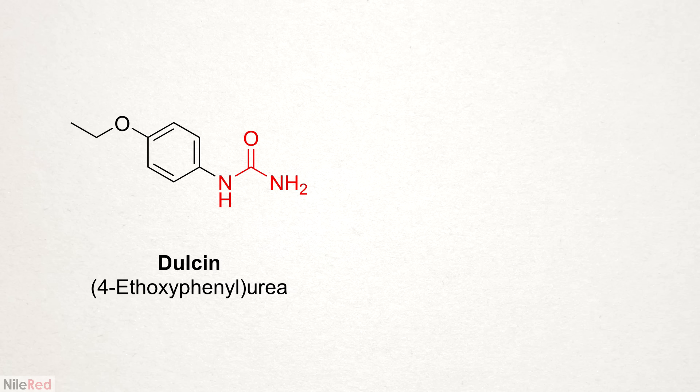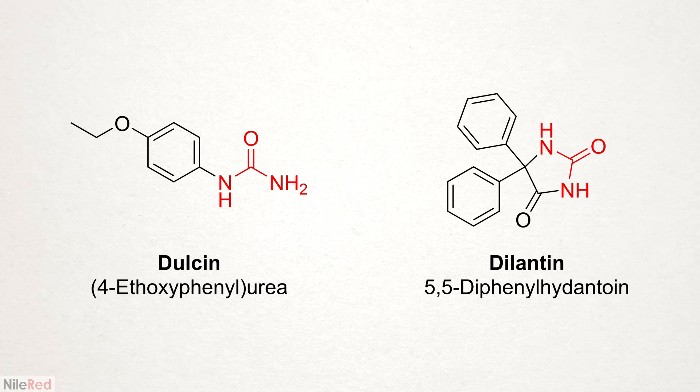For this video, I've decided to continue this month's apparent theme of urine chemistry, and I'll be isolating some urea from my own pee. Then, in some future videos, I'll be using the urea to make an old, now-banned artificial sweetener, as well as an anti-seizure medication.